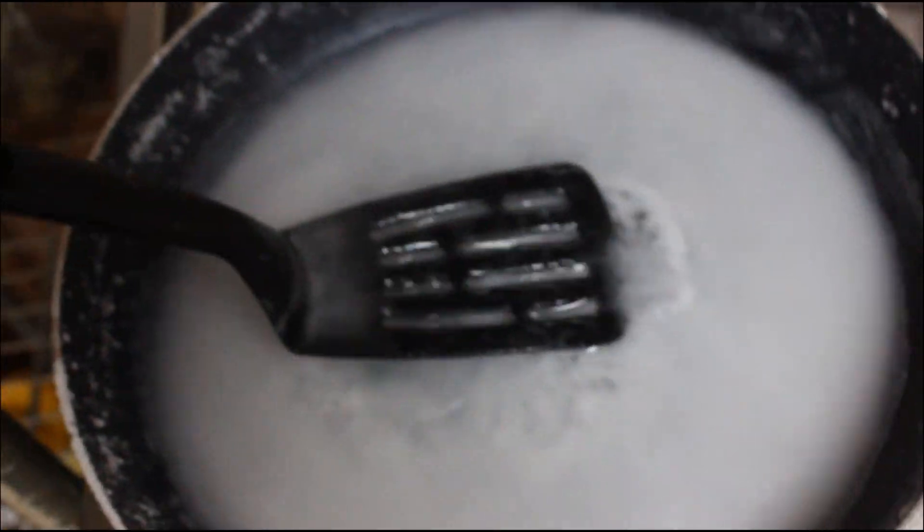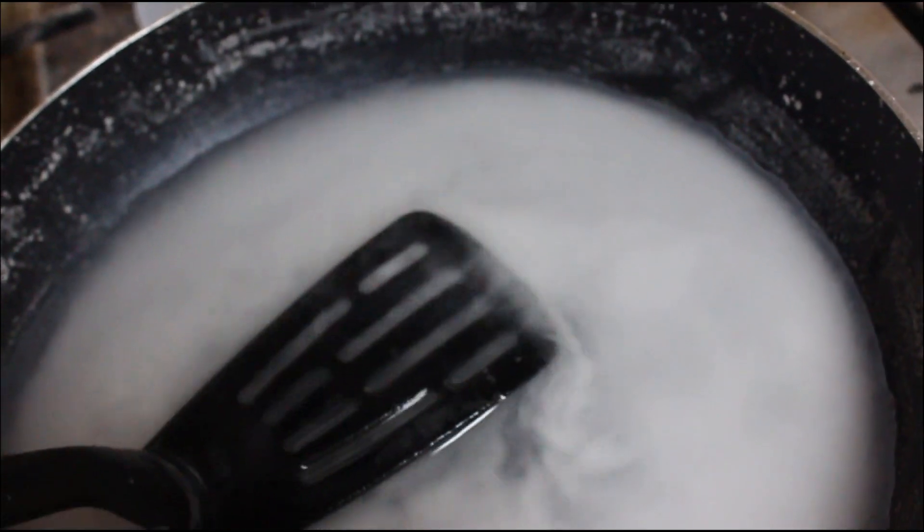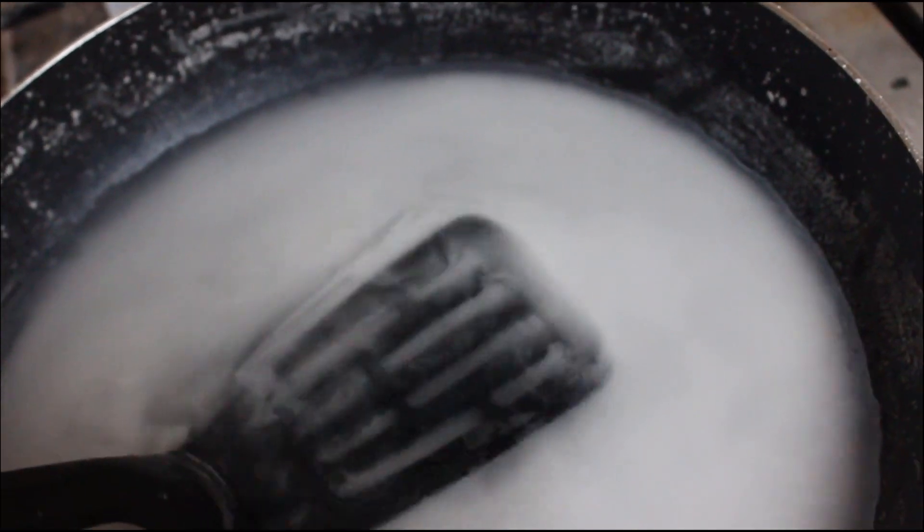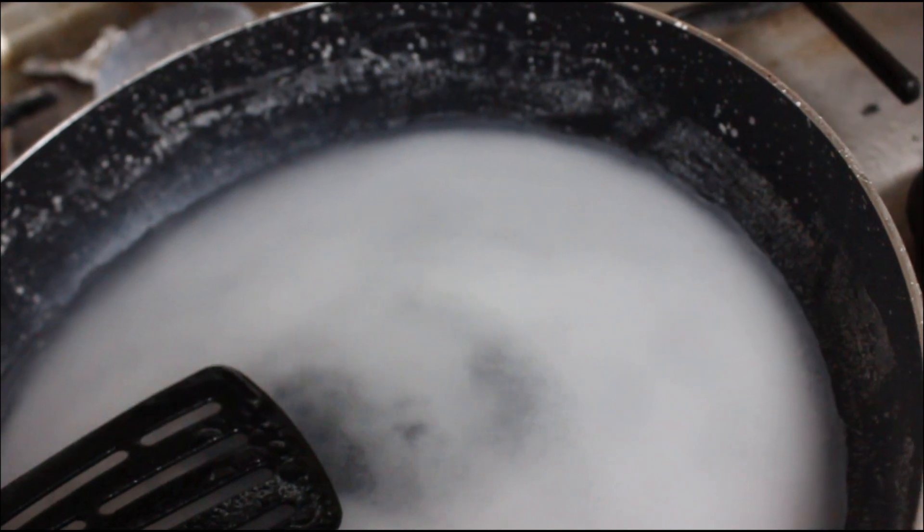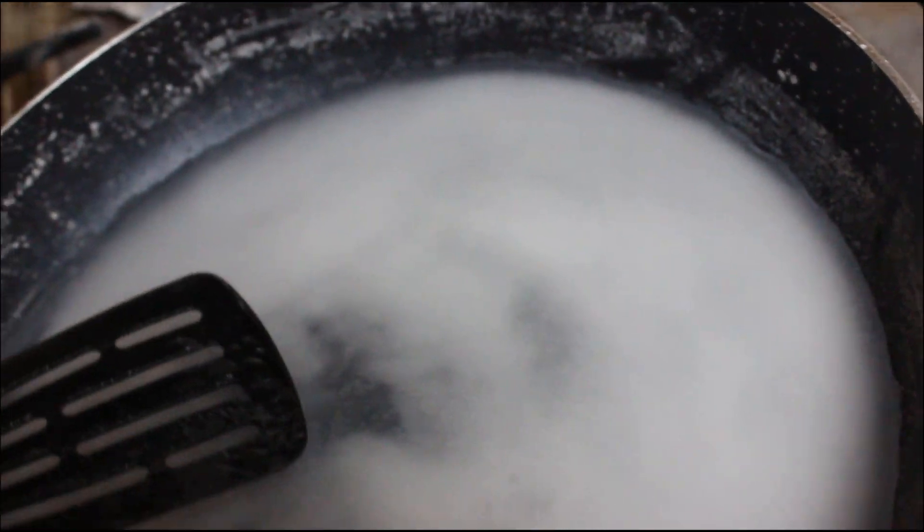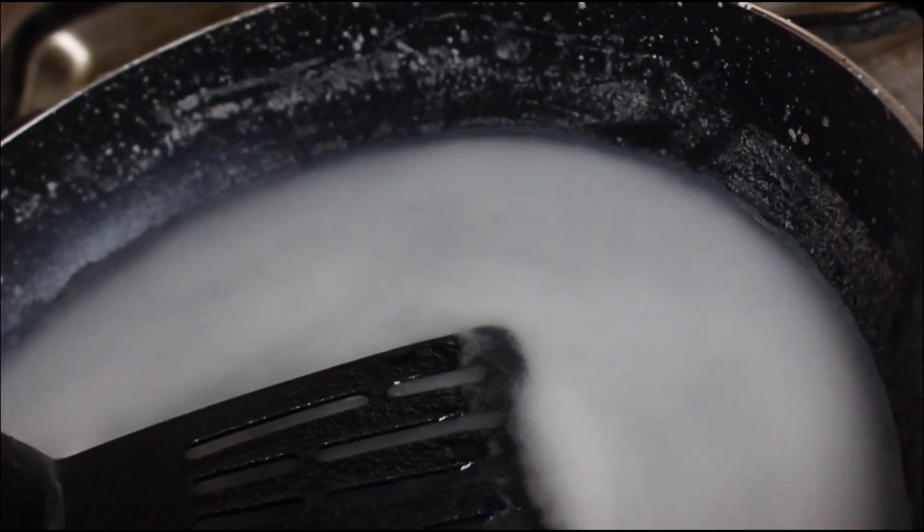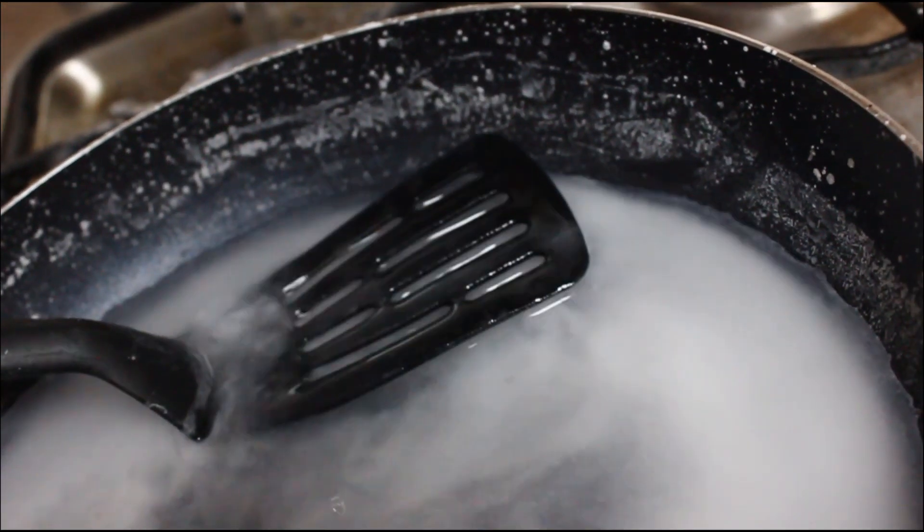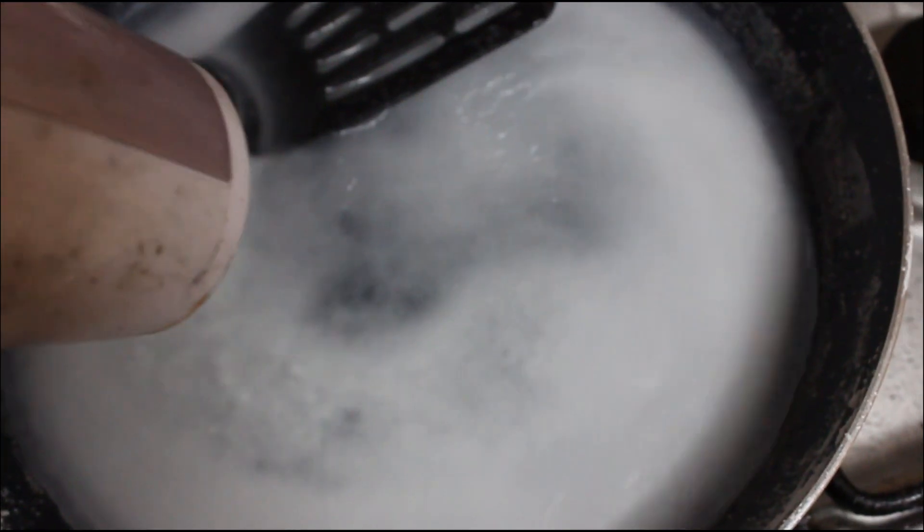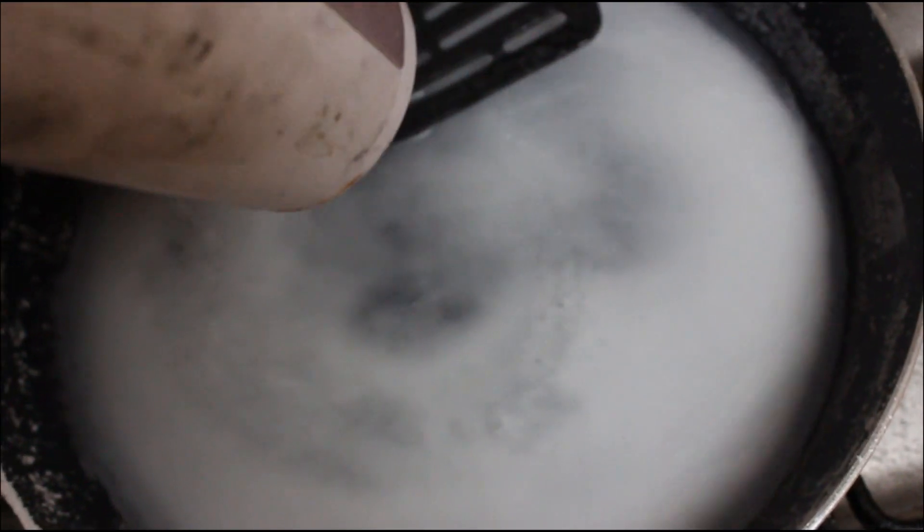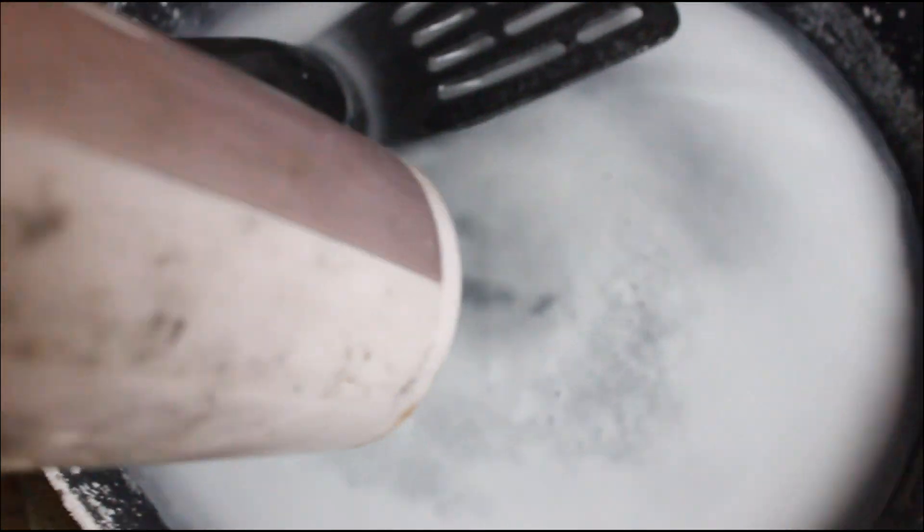This is a last minute thing, but I have to tell you something about separating chlorate from chloride. Now the thing about when you're doing fractional crystallization of the two species, there is a difference. When you're boiling out salt, you only produce thick square cubes on the surface, a really thick type of precipitate. However, once the chlorate starts coming out, it forms this really thin film on the surface. Like if I were to get my hair dryer, it forms this nice waxy film. You can see that there's like a waxy film on the surface.